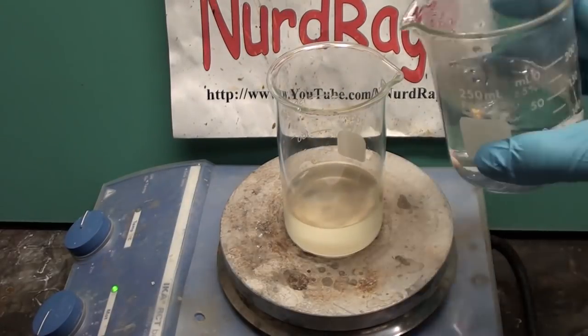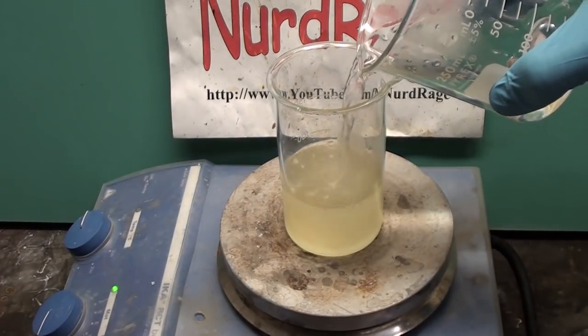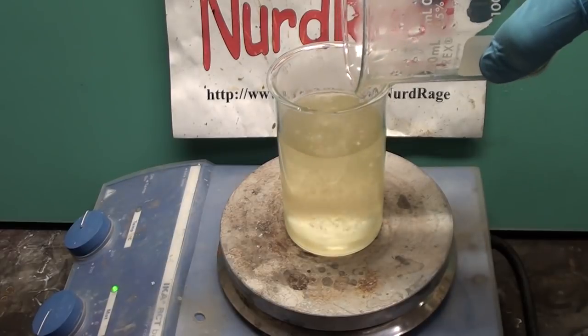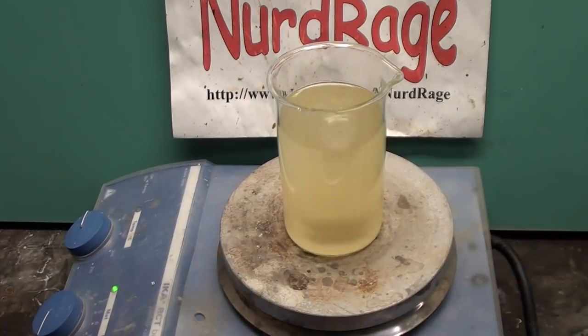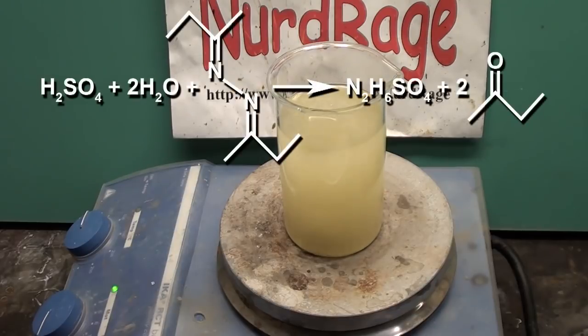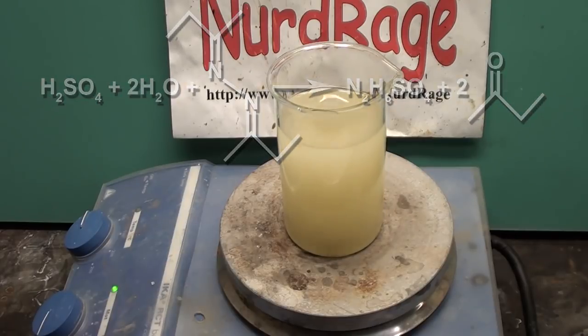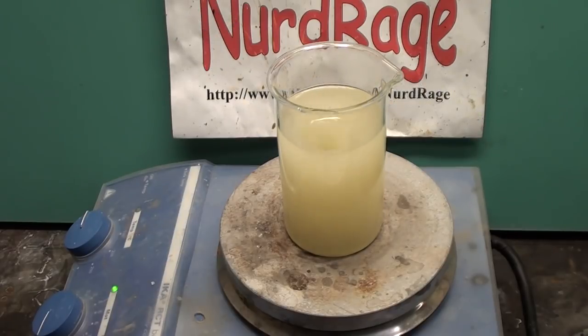Now get the methyl ethyl ketazine and pour the sulfuric acid solution directly into it while it's still hot. Stir it to dissolve the ketazine as it's very soluble and reactive with the acid. What's happening is the hot acidic solution hydrolyzes the ketazine and converts it to hydrazine sulfate and methyl ethyl ketone again. You can see the solution get cloudy. This is hydrazine sulfate crystallizing out.